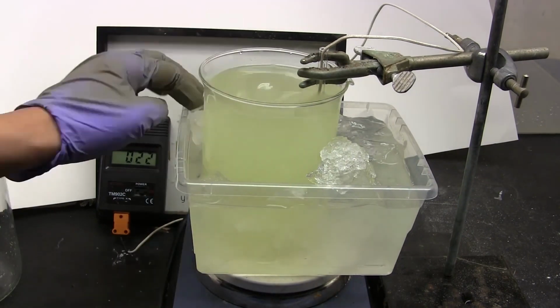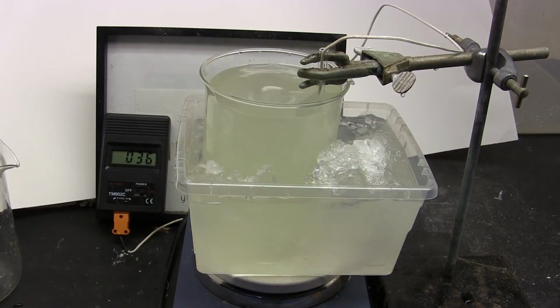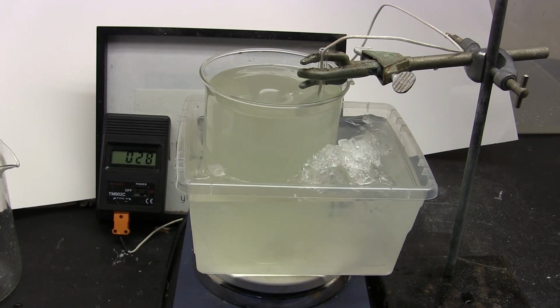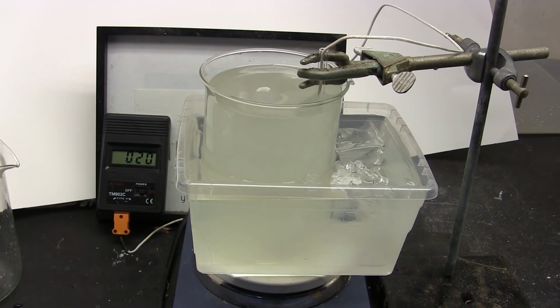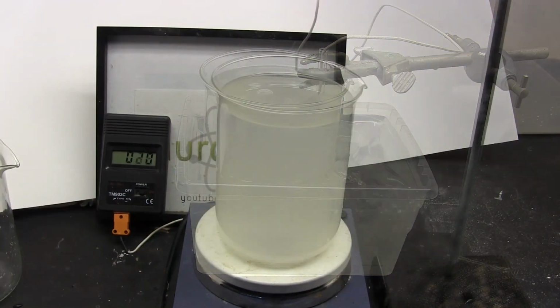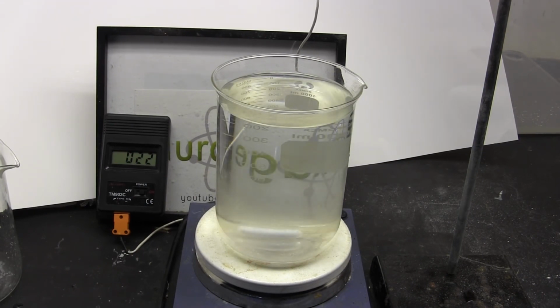Try to keep the temperature below 30 Celsius and add everything within 30 minutes. Looks like I overshot mine, but it will still work. When the reaction finally finishes, the solution will go colorless as the yellow-green hypochlorite ion is completely consumed. Now the cloudiness is from tiny little droplets of suspended chloroform, so let the containers sit until they all settle out. Now chloroform is denser than water and will form a layer on the bottom.